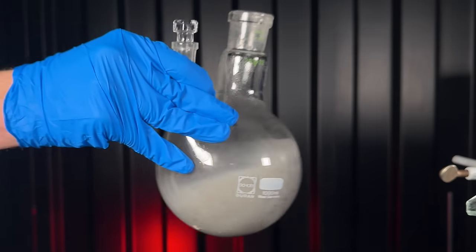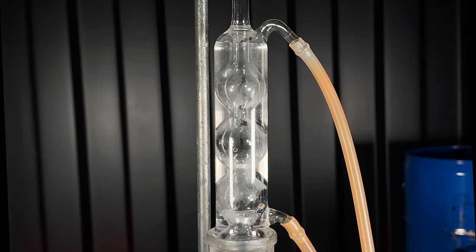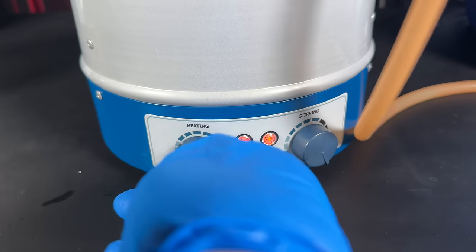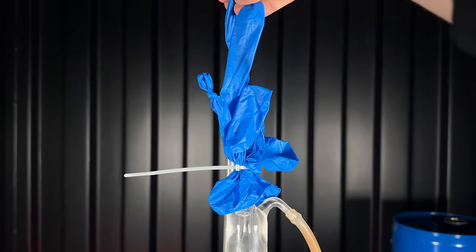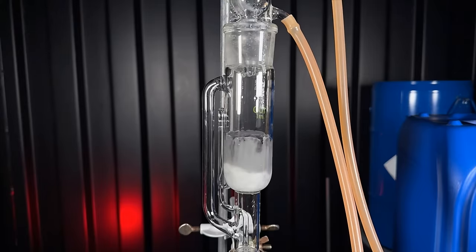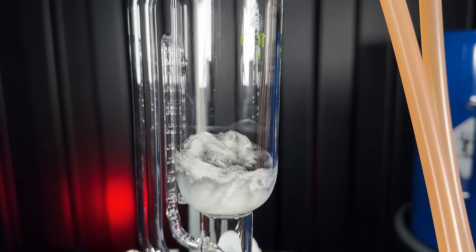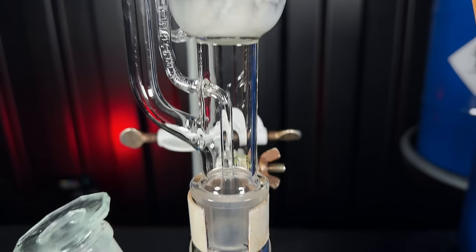It is important that the product looks nice. No matter how pure product looks to me, it seems like a reaction works better when the product looks pure, no matter how pure it actually is. To avoid too much air getting into the apparatus while still allowing for pressure compensation, I connected this glove to the top of the apparatus. Three hours in, all cyanide had been extracted, and what was left in the flask looked cleaner than before.